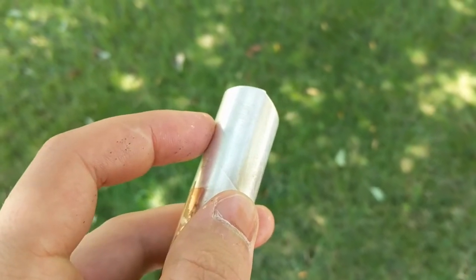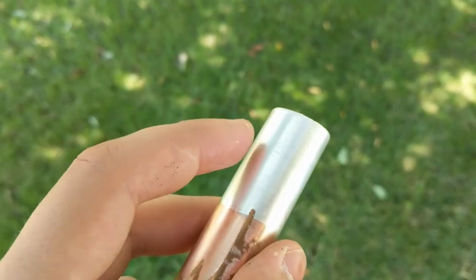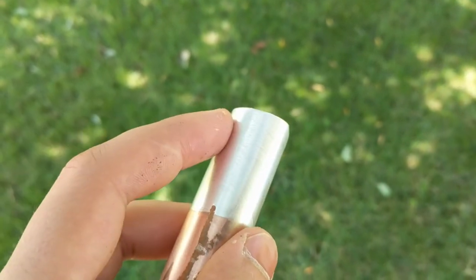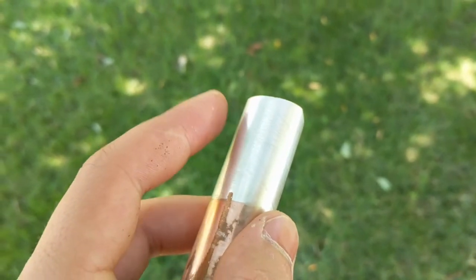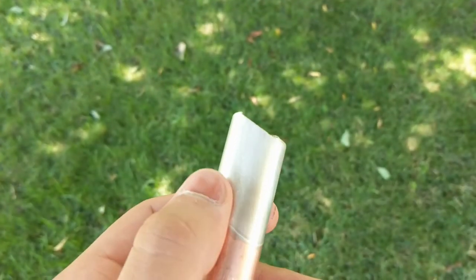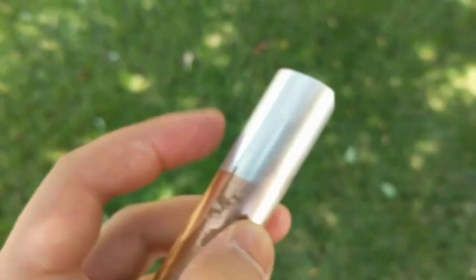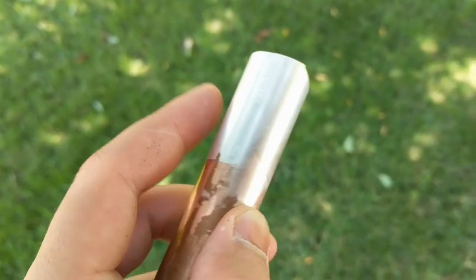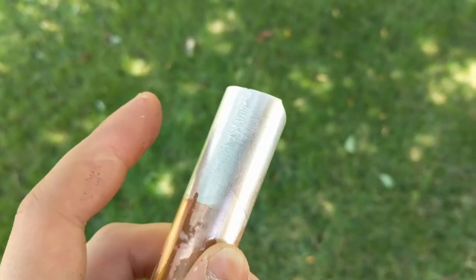The cyanide silver plating solution wasn't very hard to make, and I have to say it's much better than a silver nitrate solution — because silver nitrate absolutely ate into the copper due to the redox reaction between the two, making the surface absolutely coarse with crystal structures. I wouldn't recommend plating with silver nitrate. But this one works nicely — it's smooth, it looks the part, and I'll just be seeing how long it lasts.